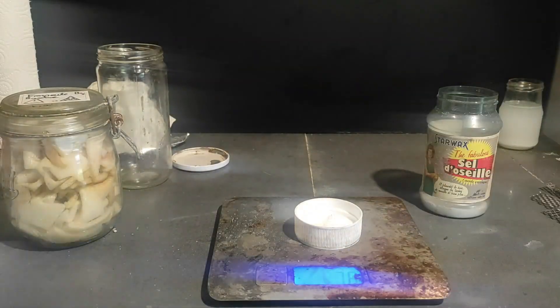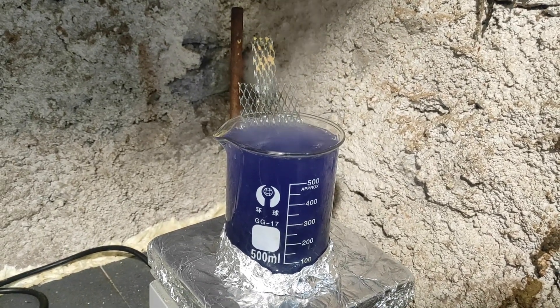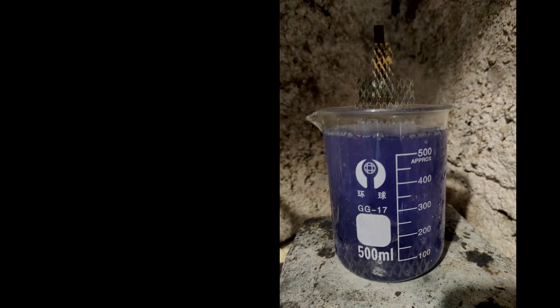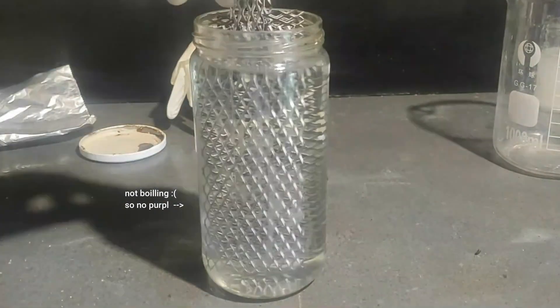You can also use oxalic acid and a pinch of fluoride salt. I boiled my titanium in hydrochloric acid for about an hour until it had become a very deep purple — so purple that my phone struggles to show the real color and makes it look a little more blue. Last time I forgot to keep it boiling continuously, which could have caused issues, so this time we ensured we'd have no problem.